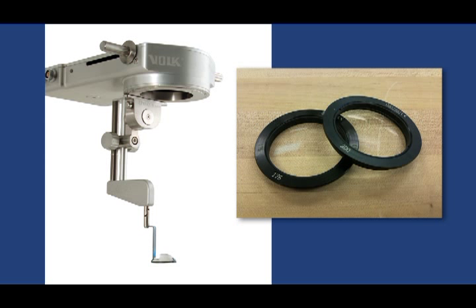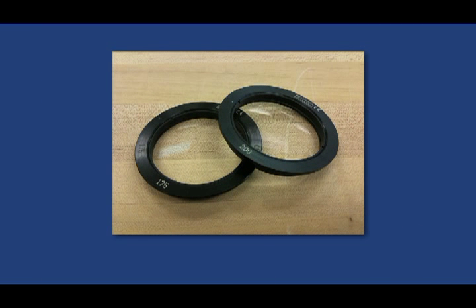Most ophthalmic surgical microscopes use either a 175mm or 200mm objective lens. Thus, the exact automated or manual CLA model required for your system will be determined by whether your objective lens has a 175mm or a 200mm focal length. It is important to note that the CLA condensing lenses are not interchangeable. Therefore, it is very important to confirm the correct condensing lens for the objective lens focal length.